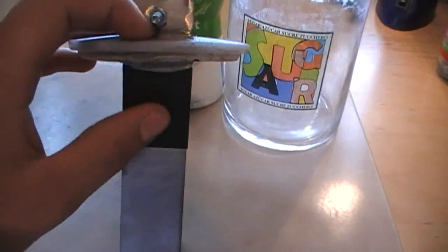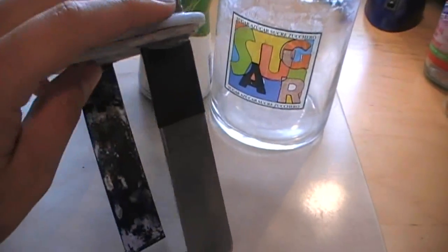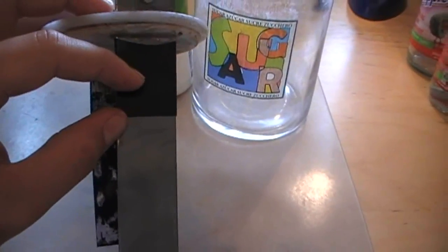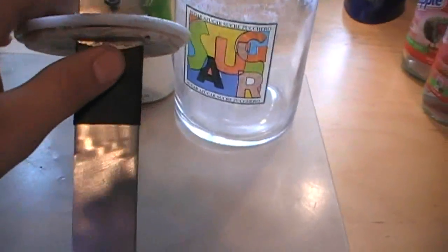So if you just put a little shrink ring tube over it it will stop it. I put a little extra so when the water evaporates before I fill it up it won't erode and produce iron chloride.